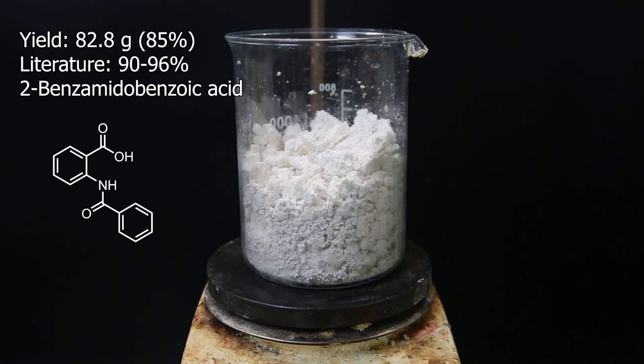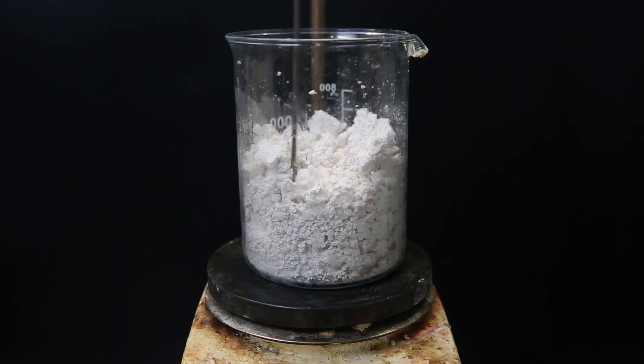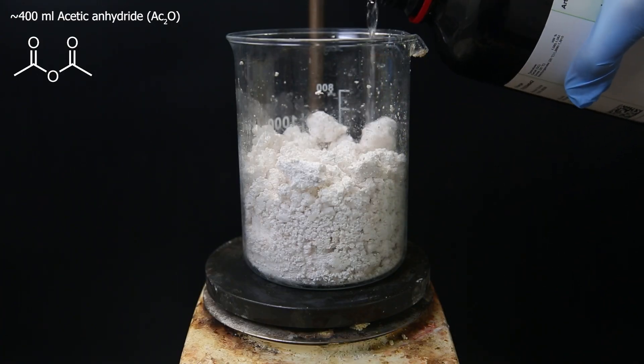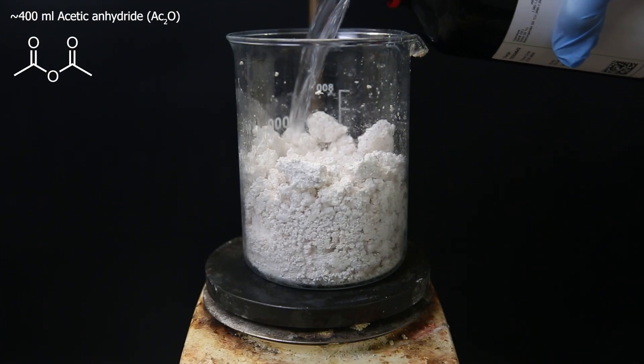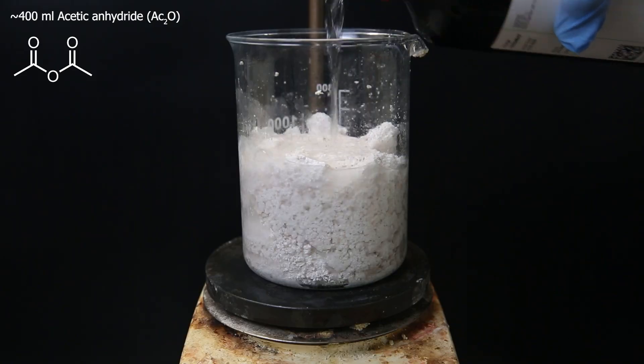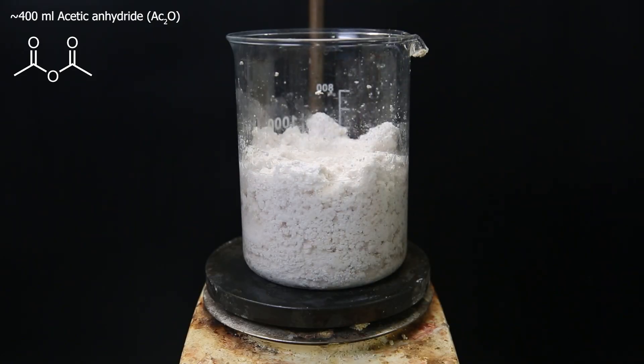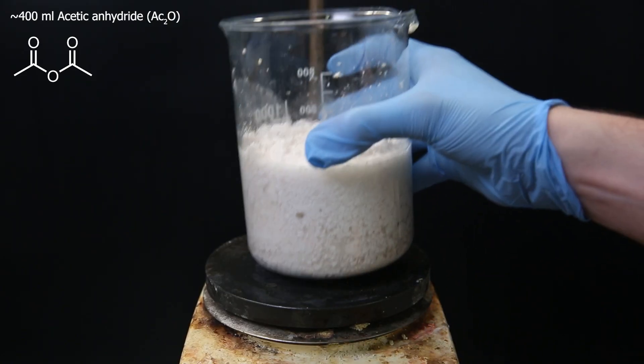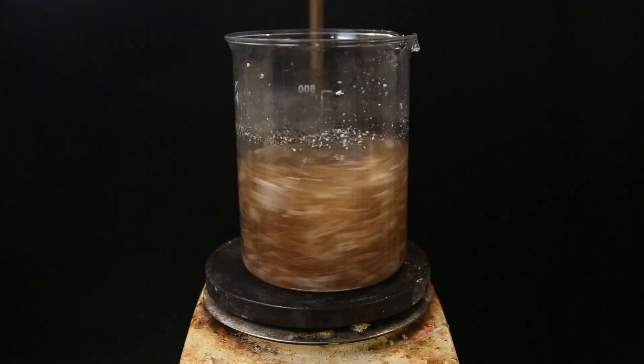Either way, it won't matter for the next reaction if there is still some solvent remaining, so I can just forward it like this. For that reaction, I first have to dissolve all the material in some acetic anhydride, of which I add about 400 ml. Acetic anhydride will react with any remaining water to form acetic acid, and the other solvents will boil off from the generated heat.